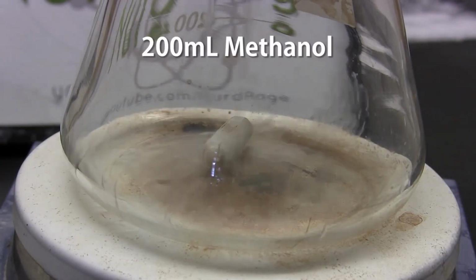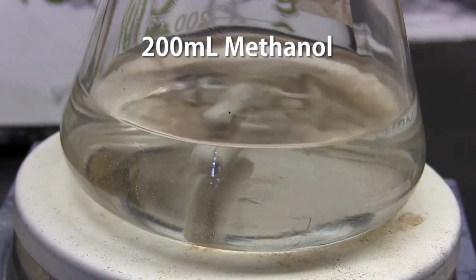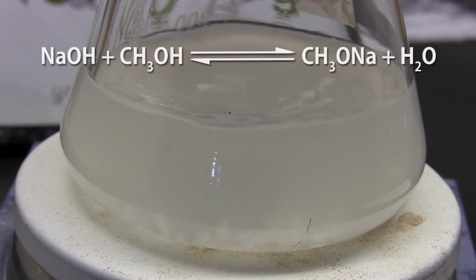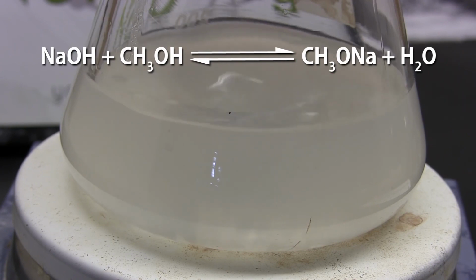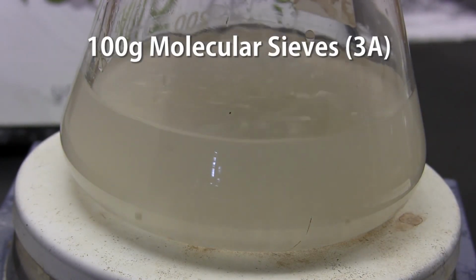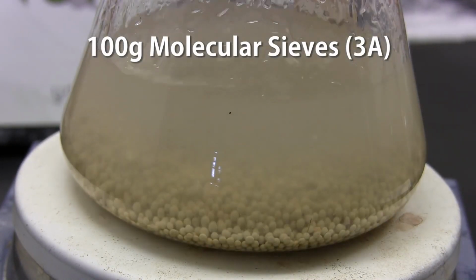To start, get 200 milliliters of methanol and add 40 grams of sodium hydroxide. Then stir until completely dissolved. What we're trying to do is make sodium methoxide, but this reaction doesn't go to completion since it's easily reversible as the water reacts with the sodium methoxide again. To force the equilibrium to the right, we add 100 grams of molecular sieves 3A.